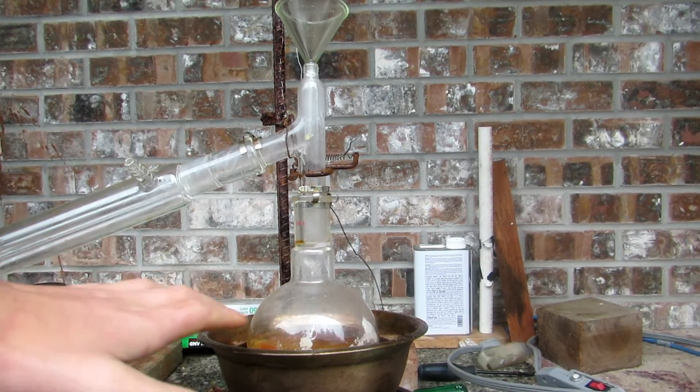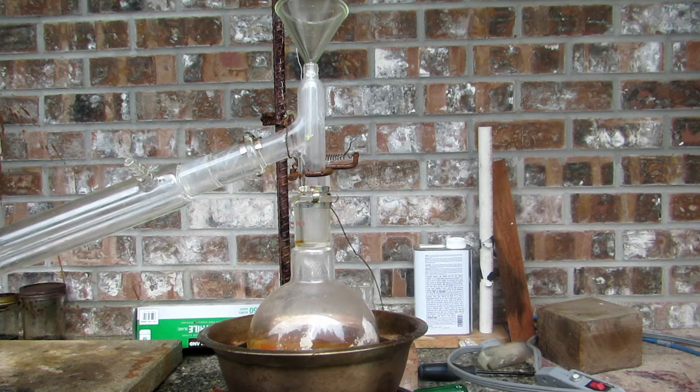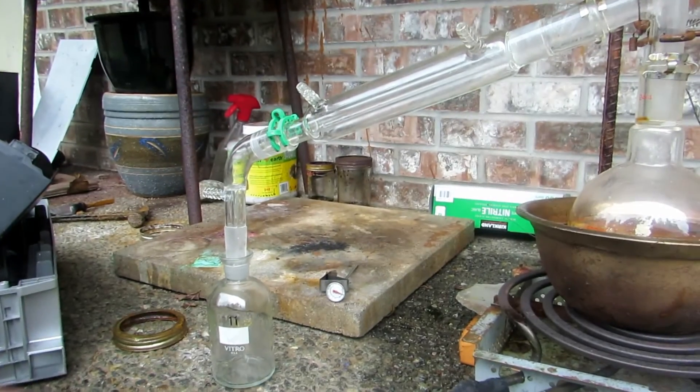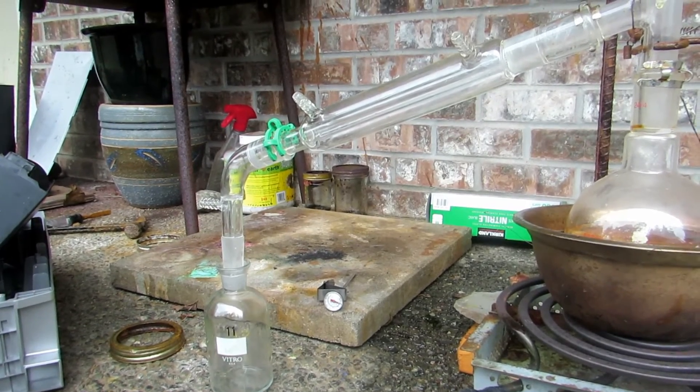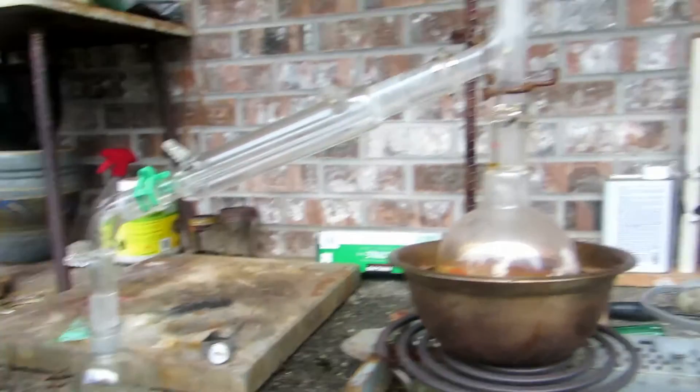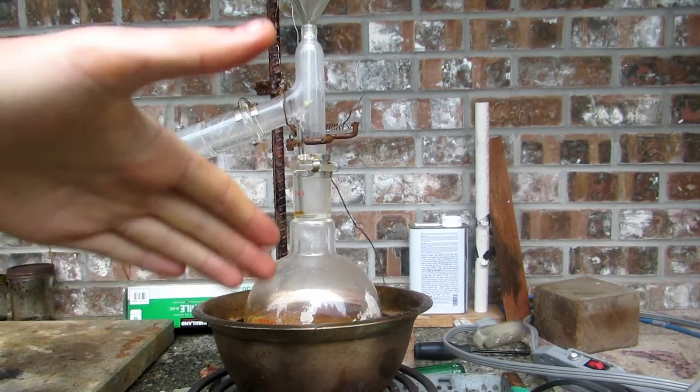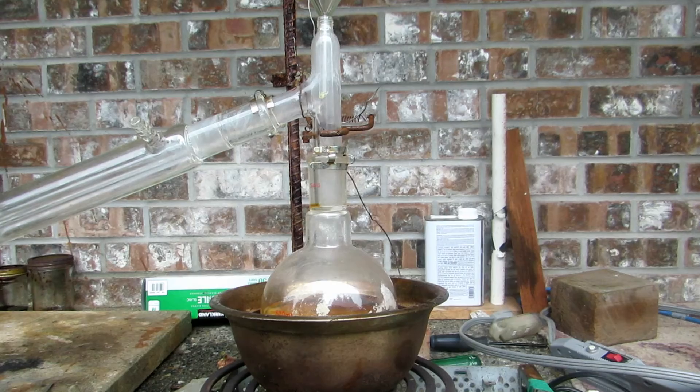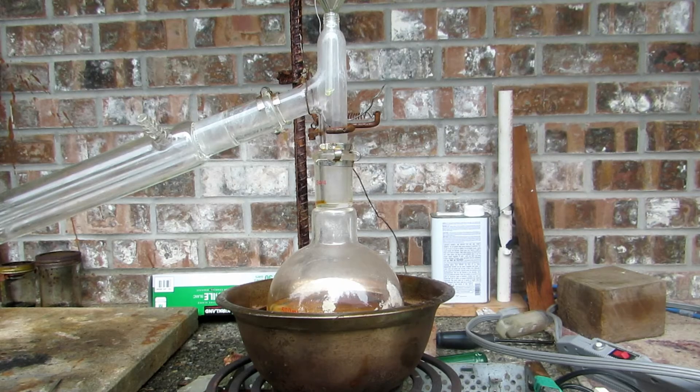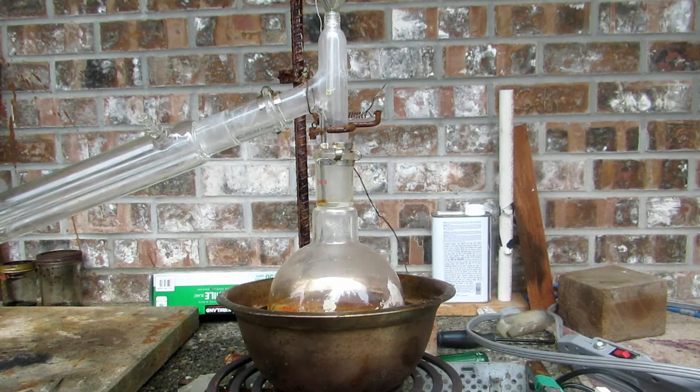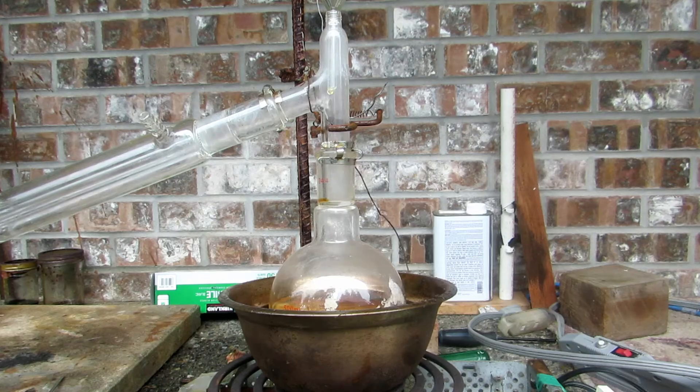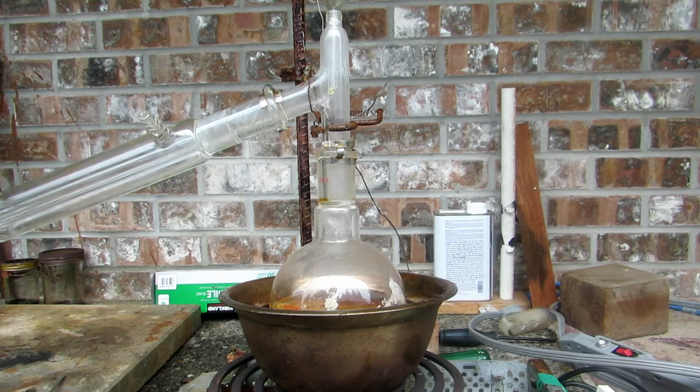So we don't have quite enough oil in here, so I'll top it up with a bit more oil for the oil bath so it can evenly heat everything. And then we're just going to crank it on to max heat. And over here in the receiving end, I just put my acid bottle here because right after we're done this, it's going to be the highest purity that we can obtain. So I'll just be storing it directly into my acid bottle here. So we'll heat up the flask, we'll start to notice that things are going to start to come over. And this will be our highly concentrated nitric acid between 85 and 90% probably. And at that point we'll just collect everything into our acid bottle. And yeah, the last thing I have to do is just put in a thermometer so we can monitor the heat. And of course, connect up the condenser so we can condense our nitric acid.